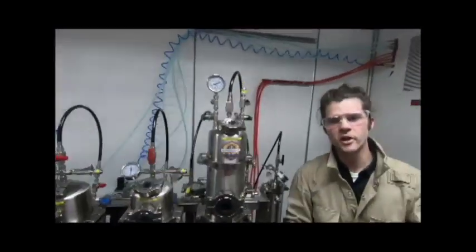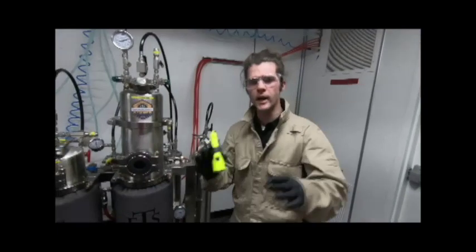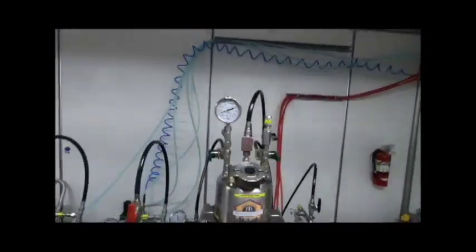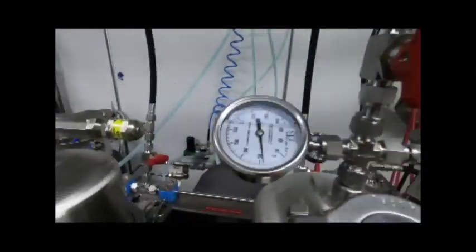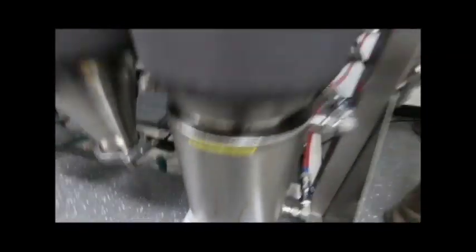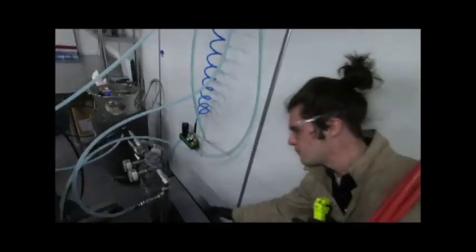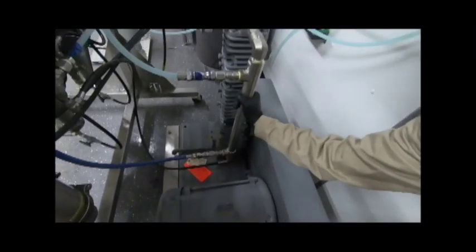Monitoring pressure, temperature, flow rate. Lines are hot. Pot is hot. Pump is cool.